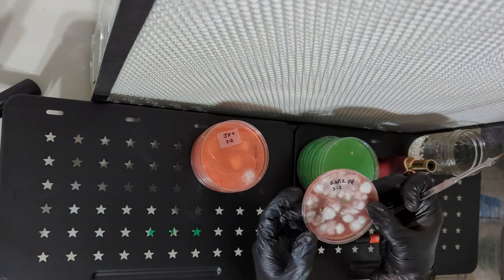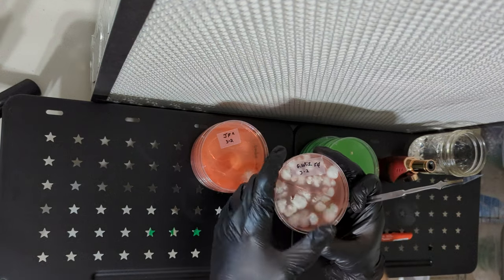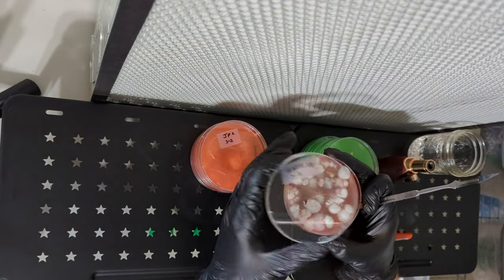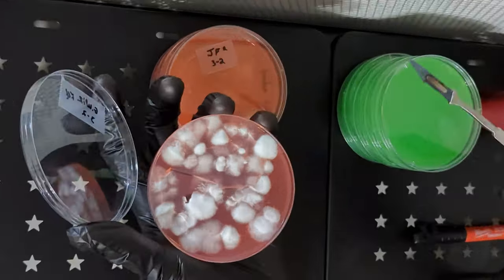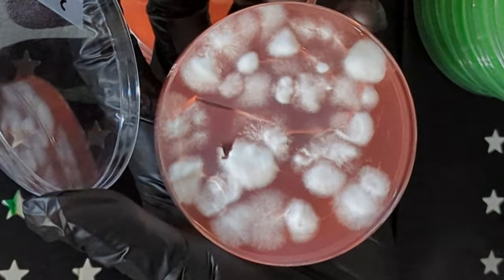Check the reviews and the ratings as well as the size of the HEPA filter. It needs to be 0.3 microns or less for mushroom cultivation. Enough about FFUs, back to agar.